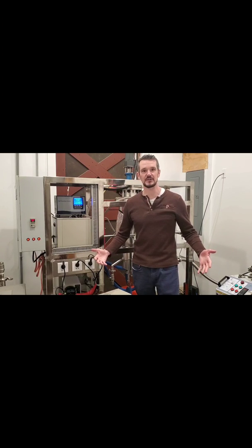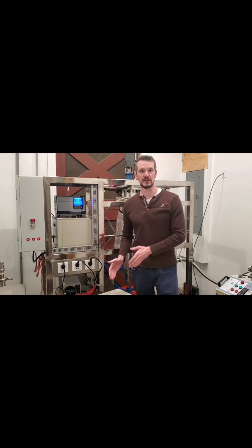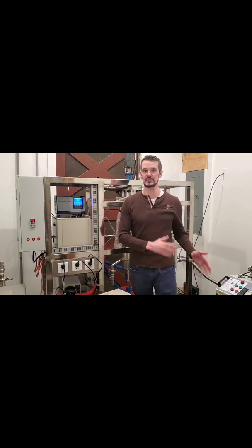Hello everyone, welcome to my laboratory. My name is Tyler and today we're going to talk about using a wiped film molecular distillation machine in order to take crude CBD oil and turn it into distillate. We're also going to talk about the differences between crude and distillate and a little bit of the science behind it. So come on in and let's have some fun.